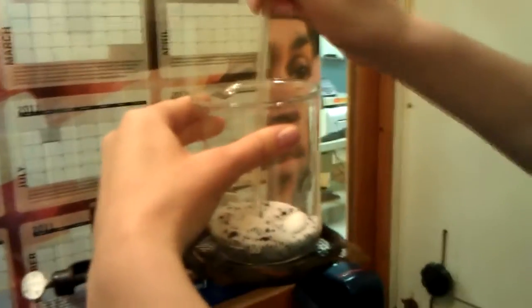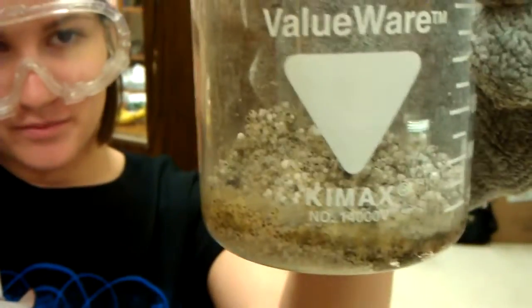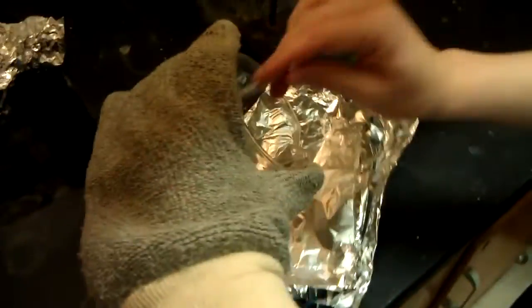So we'll come back to you in about five to ten minutes. Now that we've melted a large majority of the sugar and it's a little clucked together, we can place this onto like ten layers of aluminum foil in the fume hood.